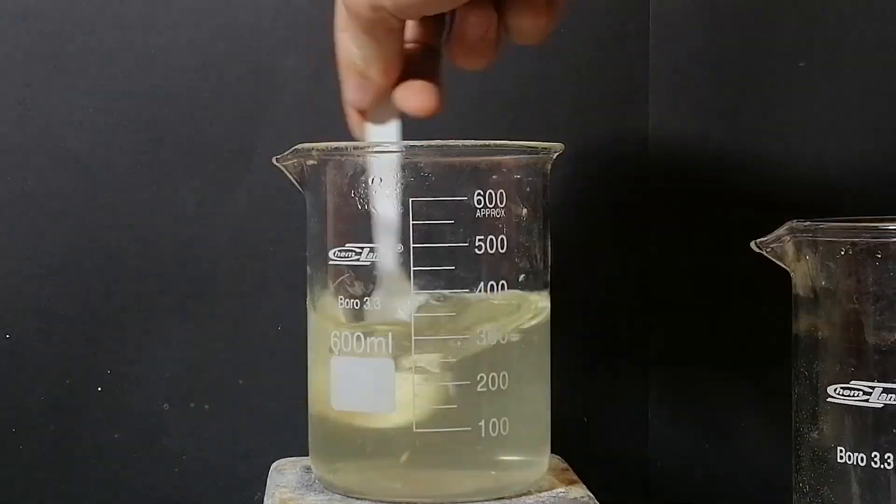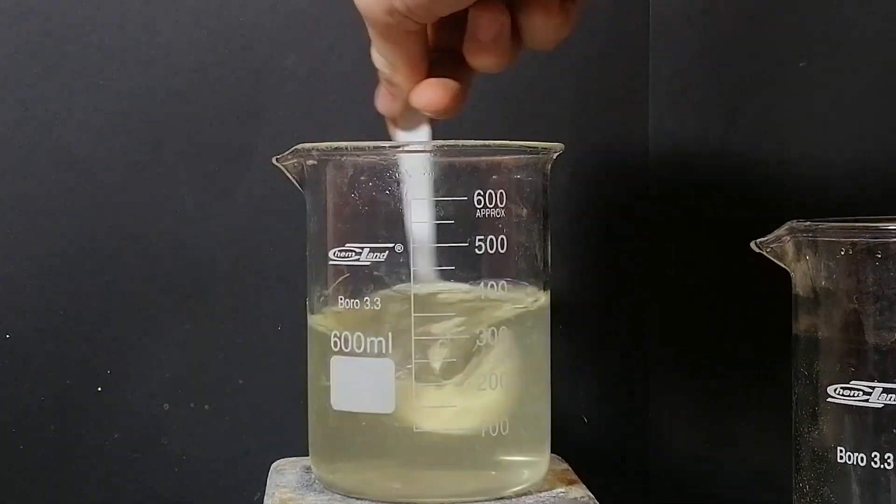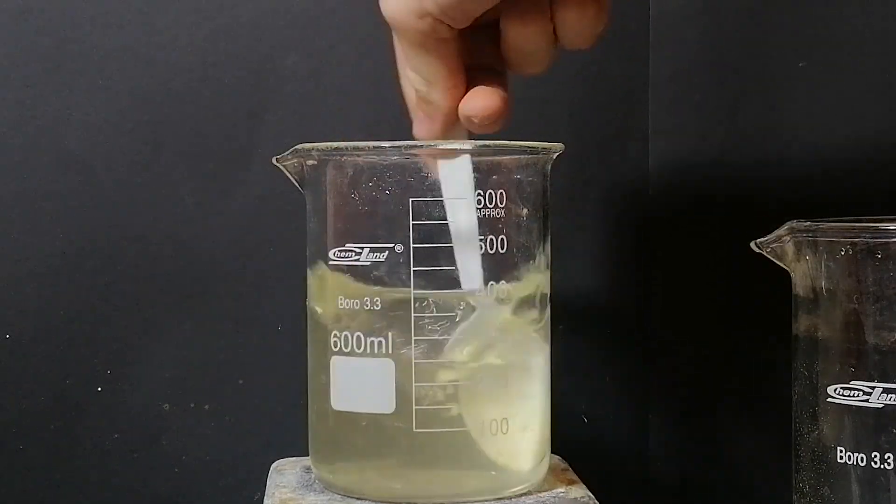At first there was no immediate precipitate, however eventually something started crystallizing. Basically, by adding potassium chloride we're replacing the sodium ion in the chlorate with the potassium ion.